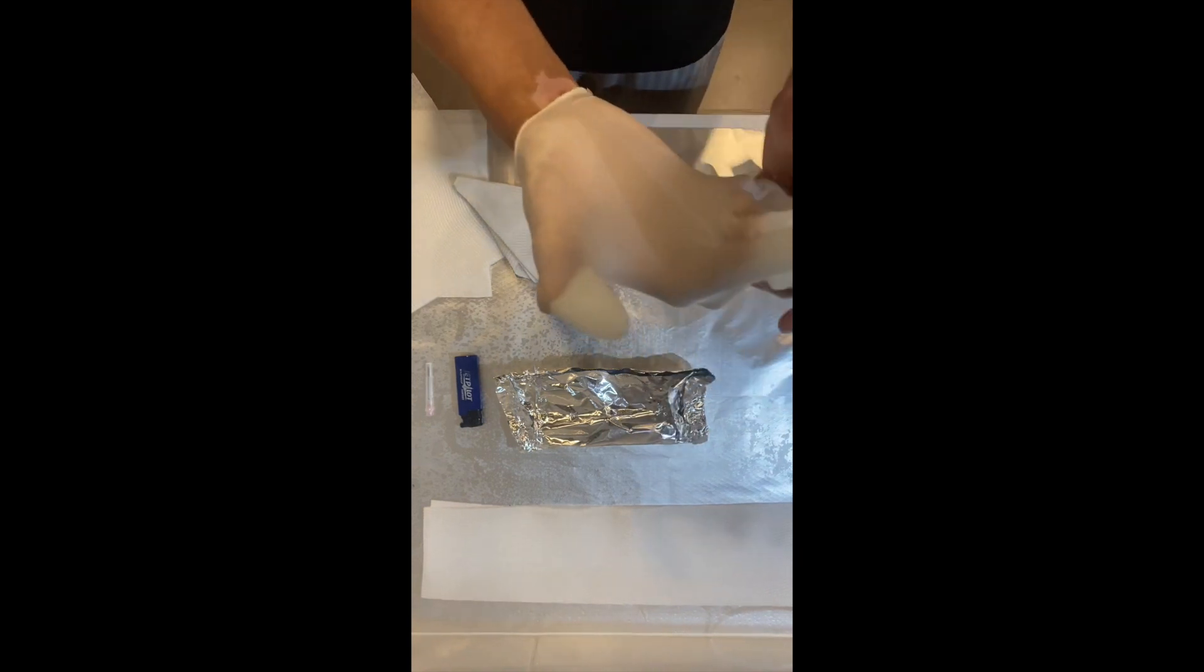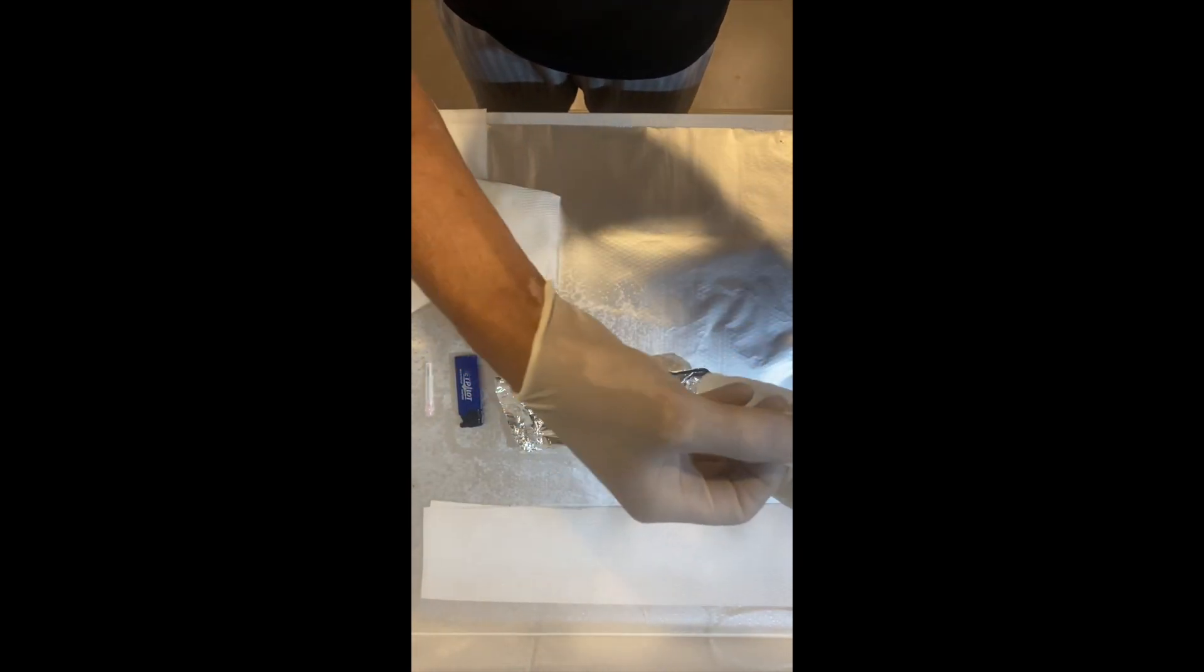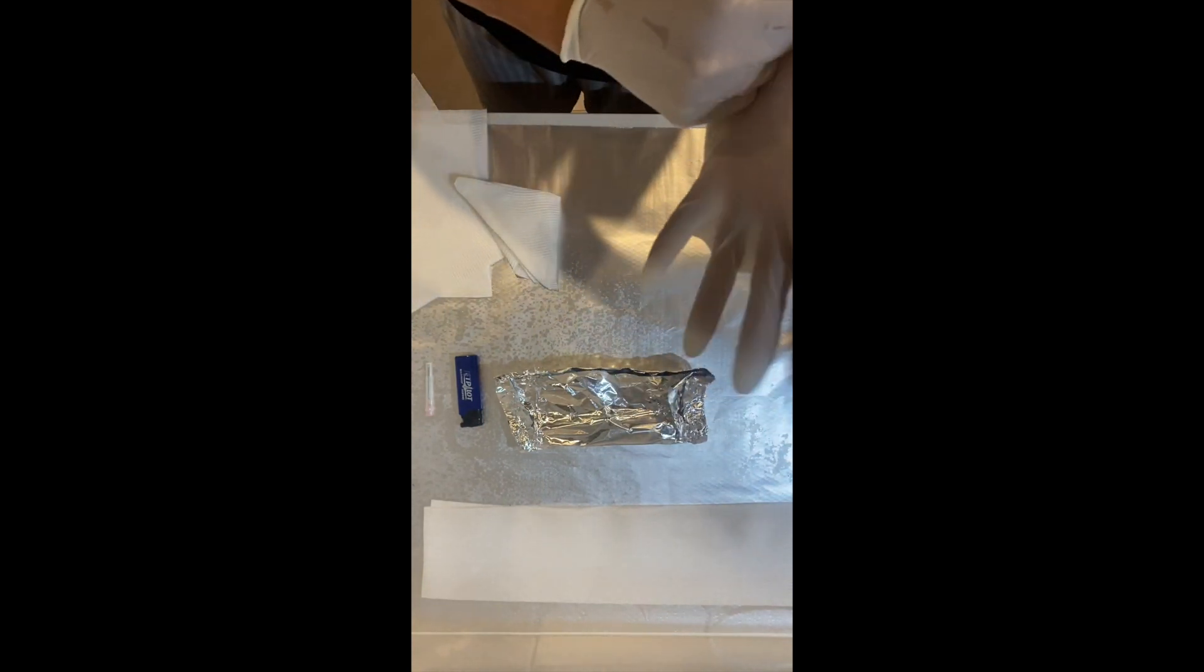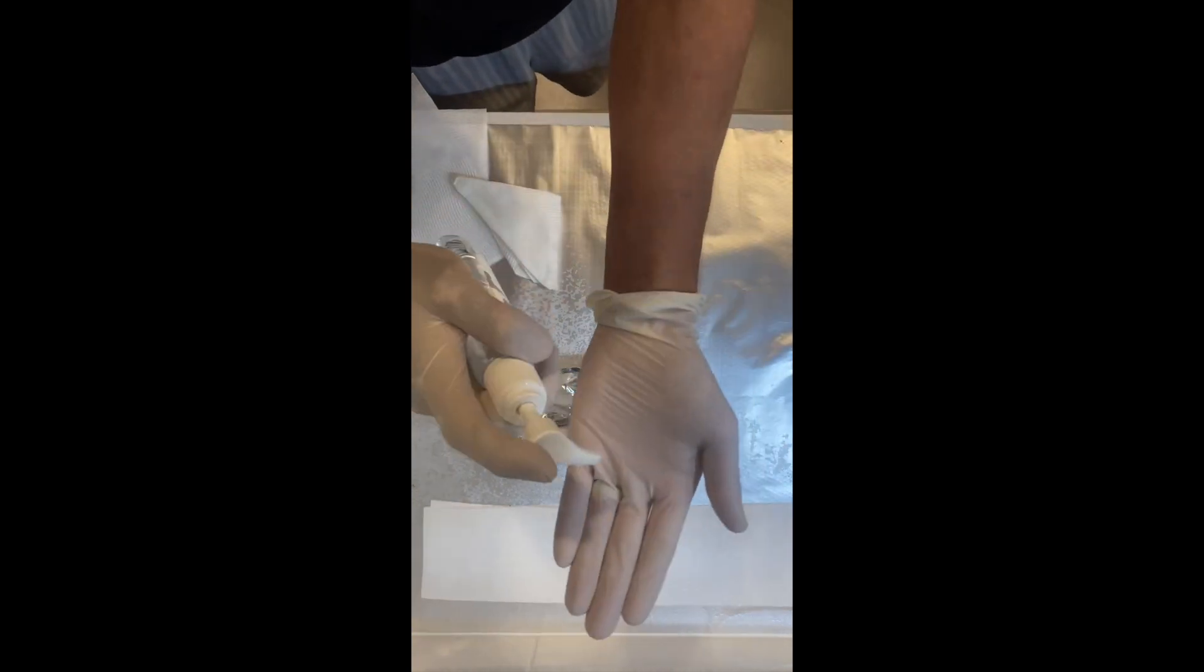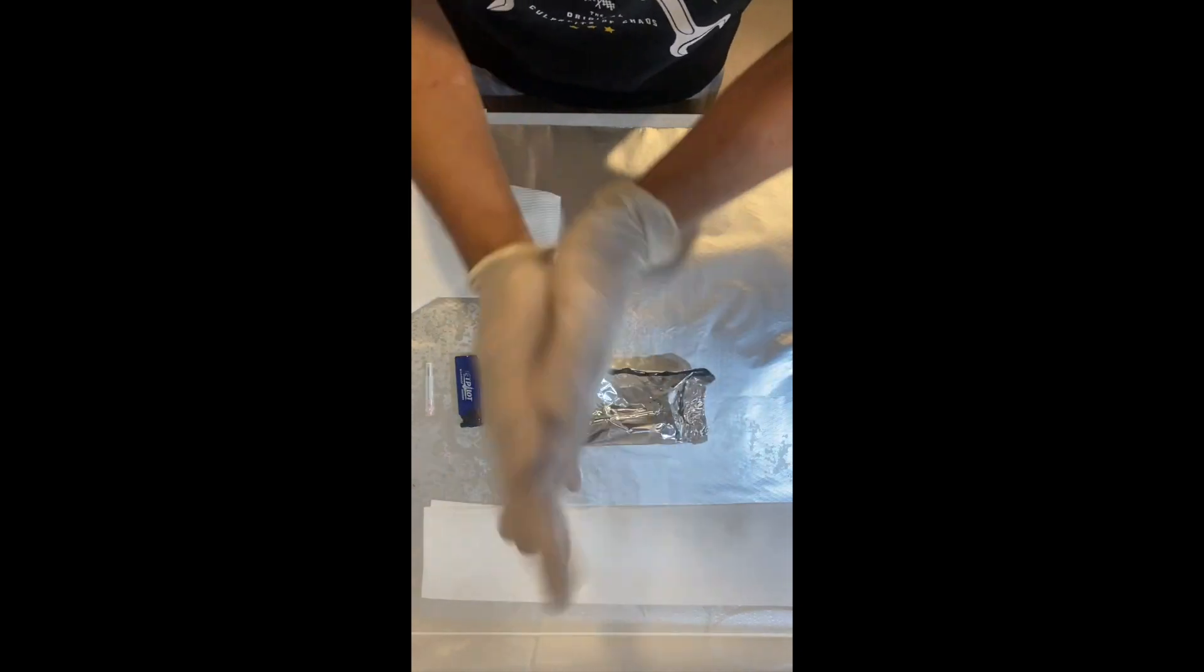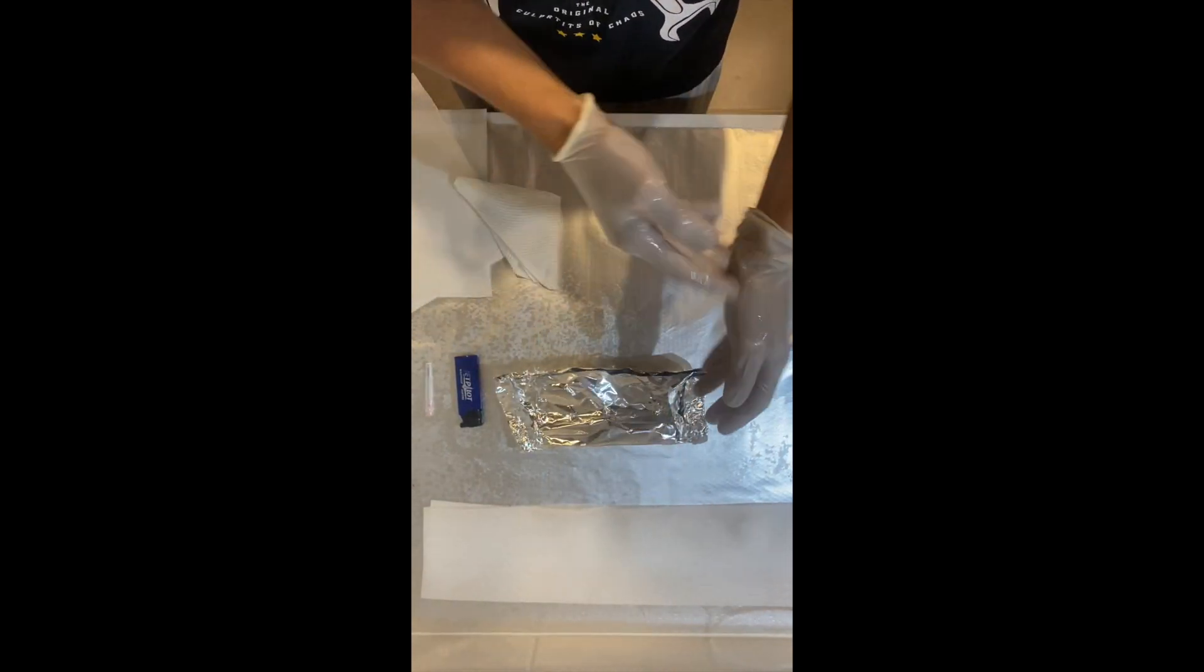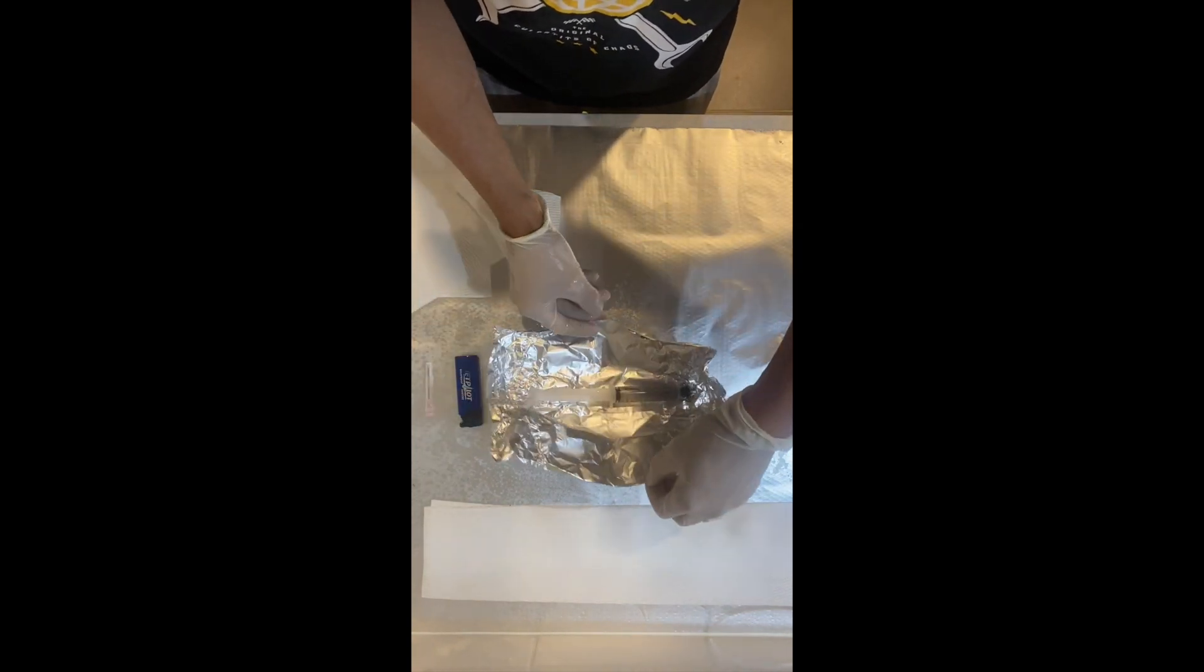I know they say these gloves are sterile in the packet, but just in handling them, taking them out and whatnot, I don't trust them. So once I put them on, a little bit of hand sanitizer, and we are ready to go. We're going to open up our spore syringe.